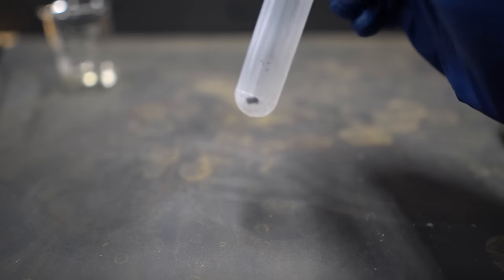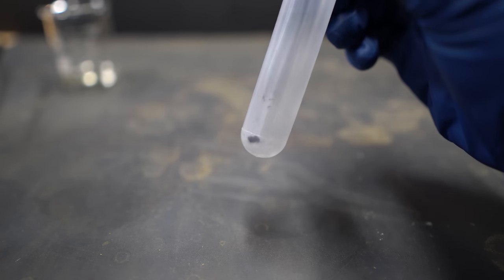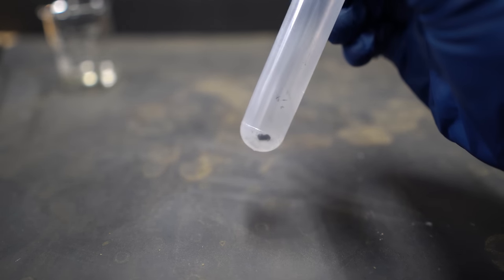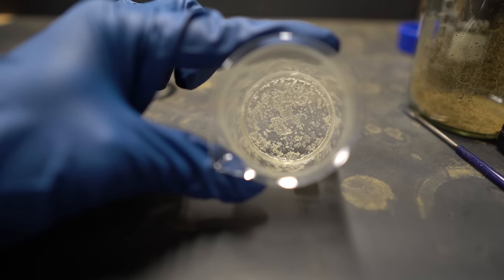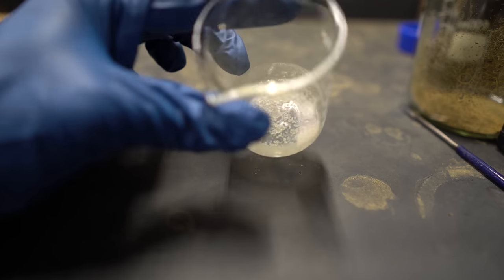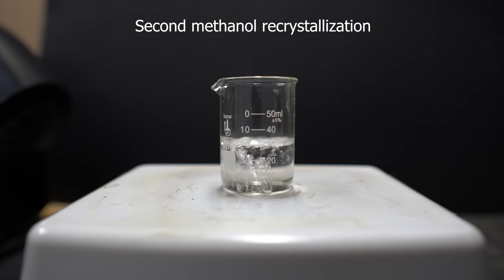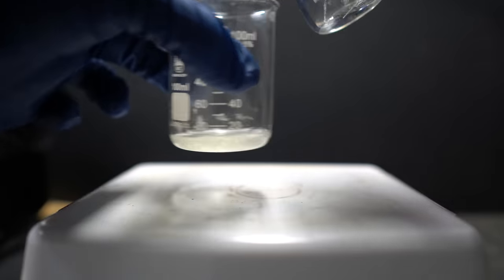I really made sure to wash out the vial and the beaker as much as I could just so we got every single crystal into solution. You can see that when I dumped the liquid out, it's nice and clear, and at the bottom of the tube you can see that we actually do have our charcoal impurity. This is the thing that ruined everything, so thanks a lot activated charcoal. It was then put under a fan so we can evaporate all the acetone out, and here is our much cleaner product now.